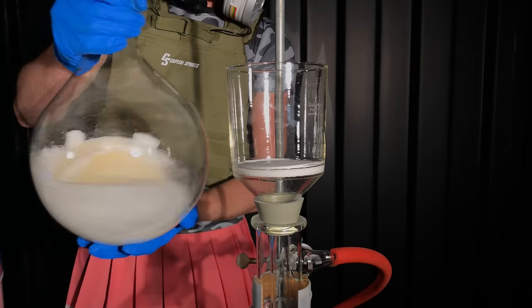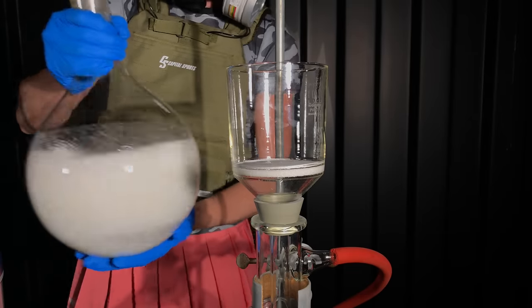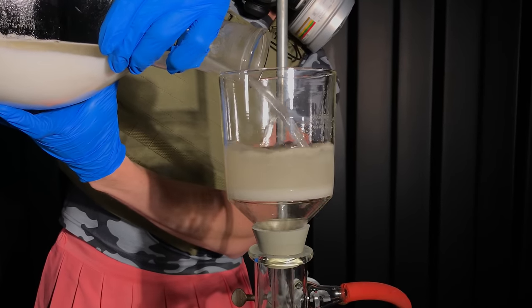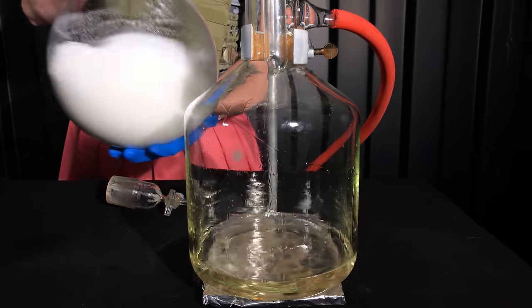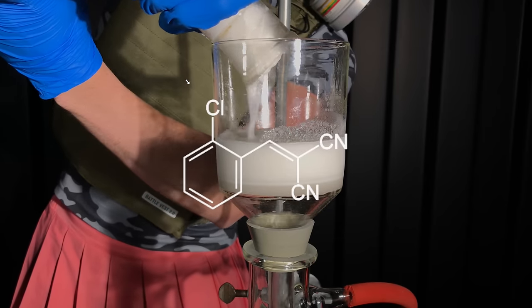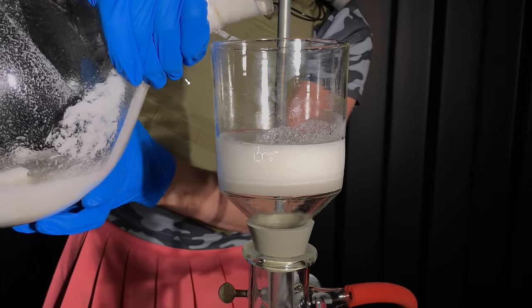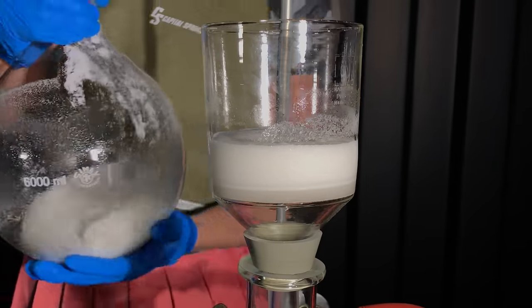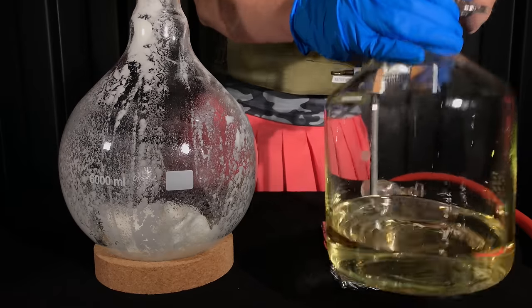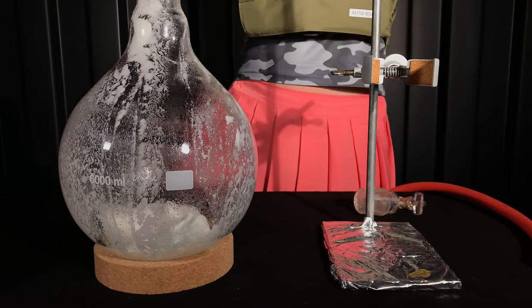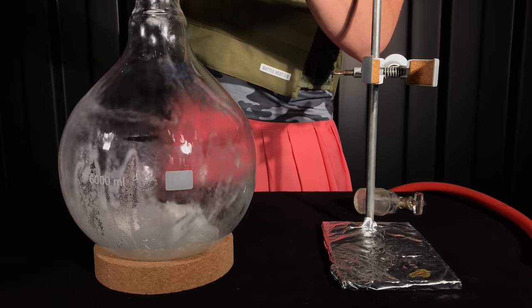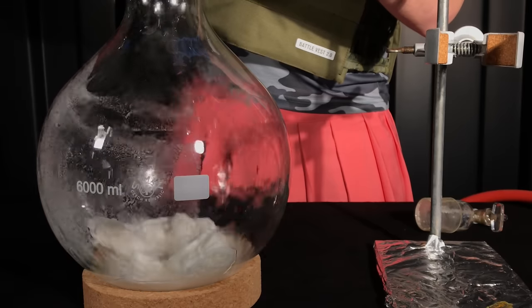And to remove the solvent, a small vacuum filtration setup like this is ideal. By the way, if you are wondering where the name CS stems from, it's not from the chlorine in the molecule and the letter S that magically appeared, but from the creator's names Corson and Stoughton. Rinsing the flask is ideally done by reusing the saturated methanol solution and not fresh solvent. By doing it this way, you avoid losing precious product.